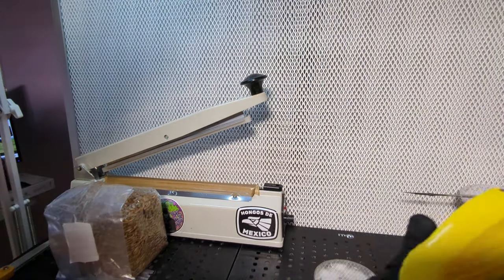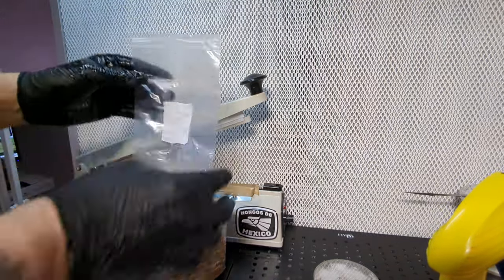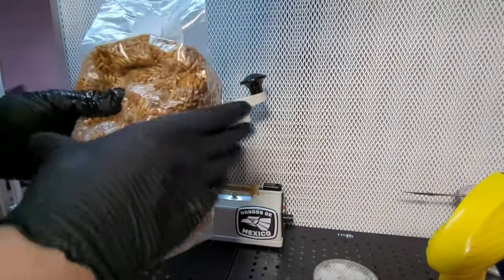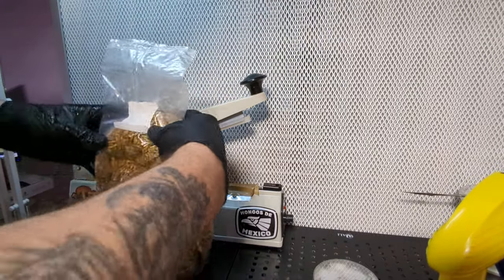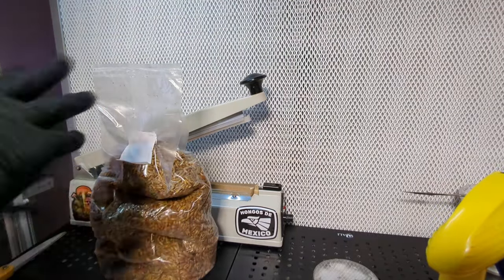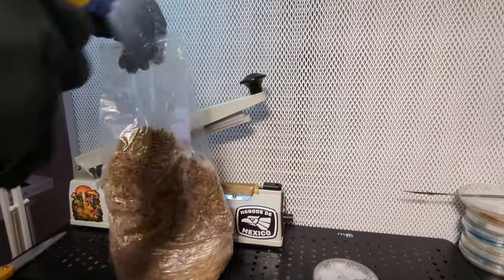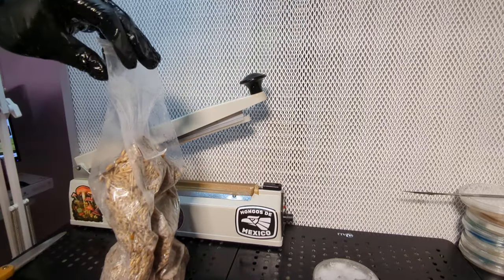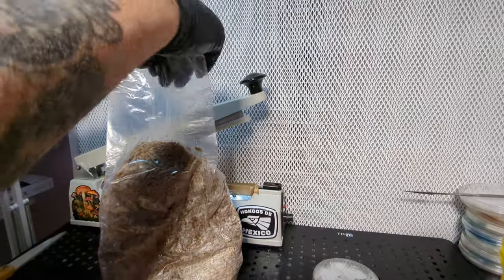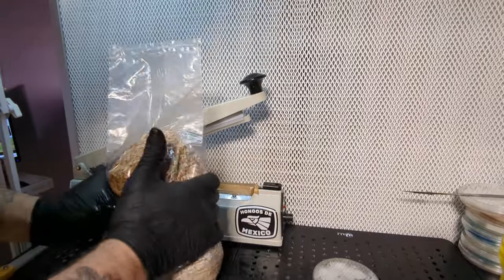I'm going to re-sanitize my hands. I've got my grain bag over here ready to go - this is pre-sterilized grains, just oats, which is what I use. I just kind of squeeze them and break them up so everything's loose. I squish it that way so it helps the bag stand up and the flap won't fall over and touch anything and get funky. Then I'm going to spray it down with alcohol, getting up in these gussets good, and work the alcohol up towards the top of the gusset getting all those crevices, so that when I cut this off there's no chance there's anything funky in there.